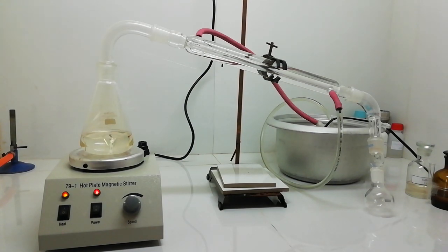After recording this, I am going to cover the whole setup with aluminum foil. Let's see what is going on here. There's water present in this nitric acid. When we add sulfuric acid, sulfuric acid bonds with that water.